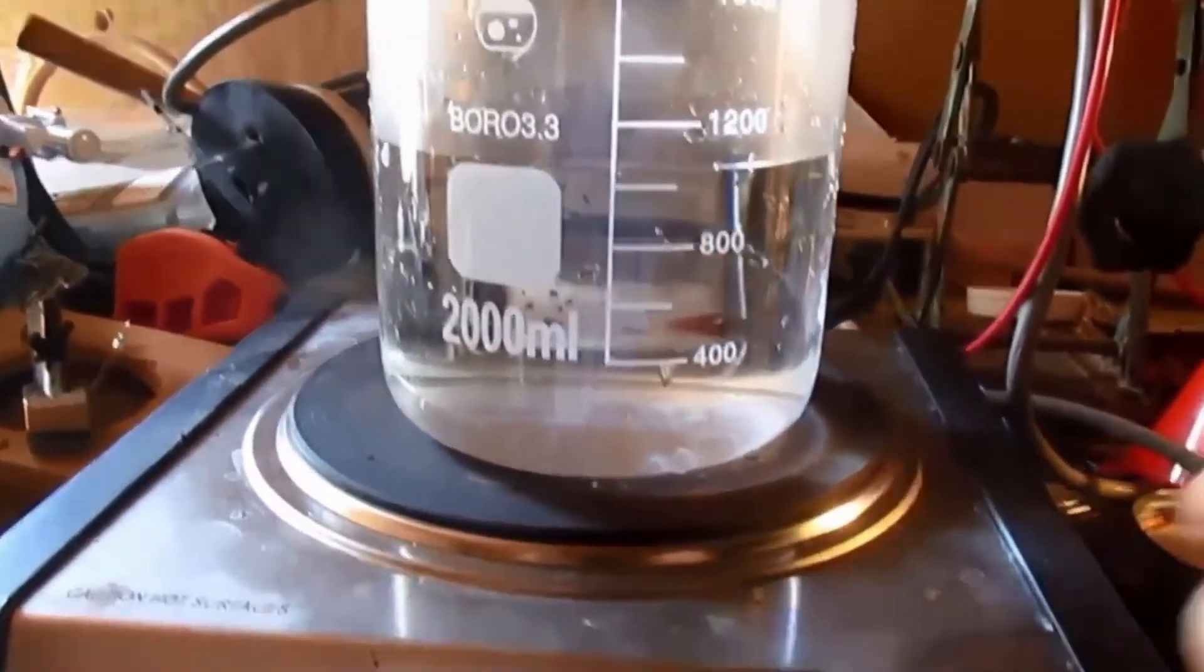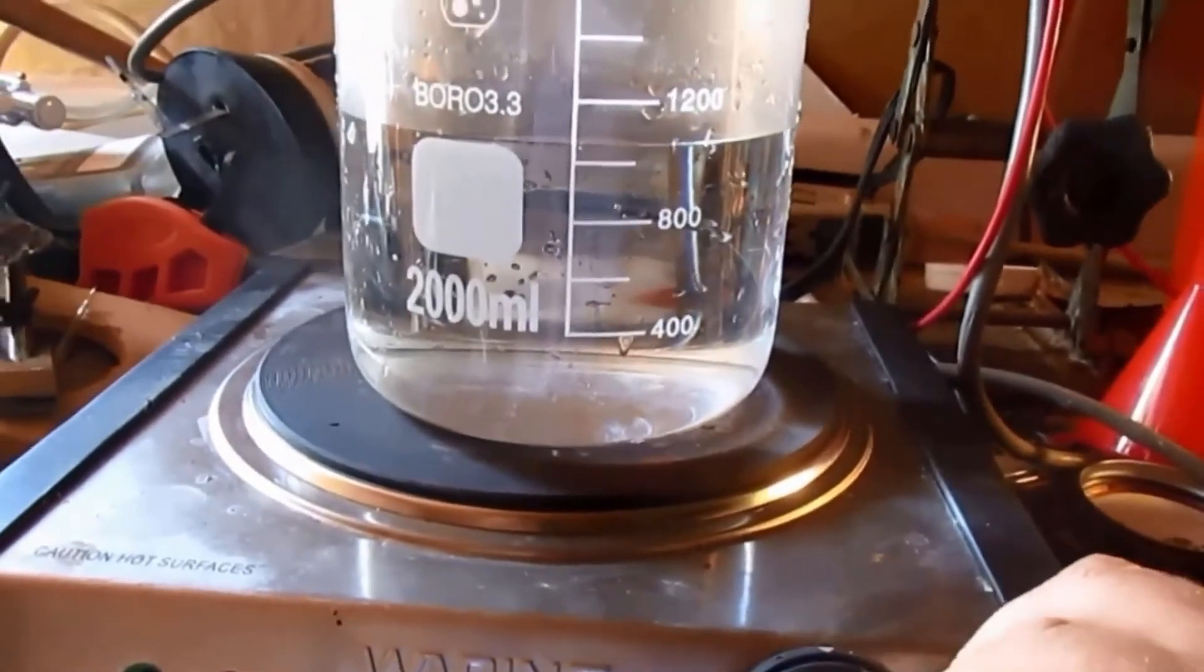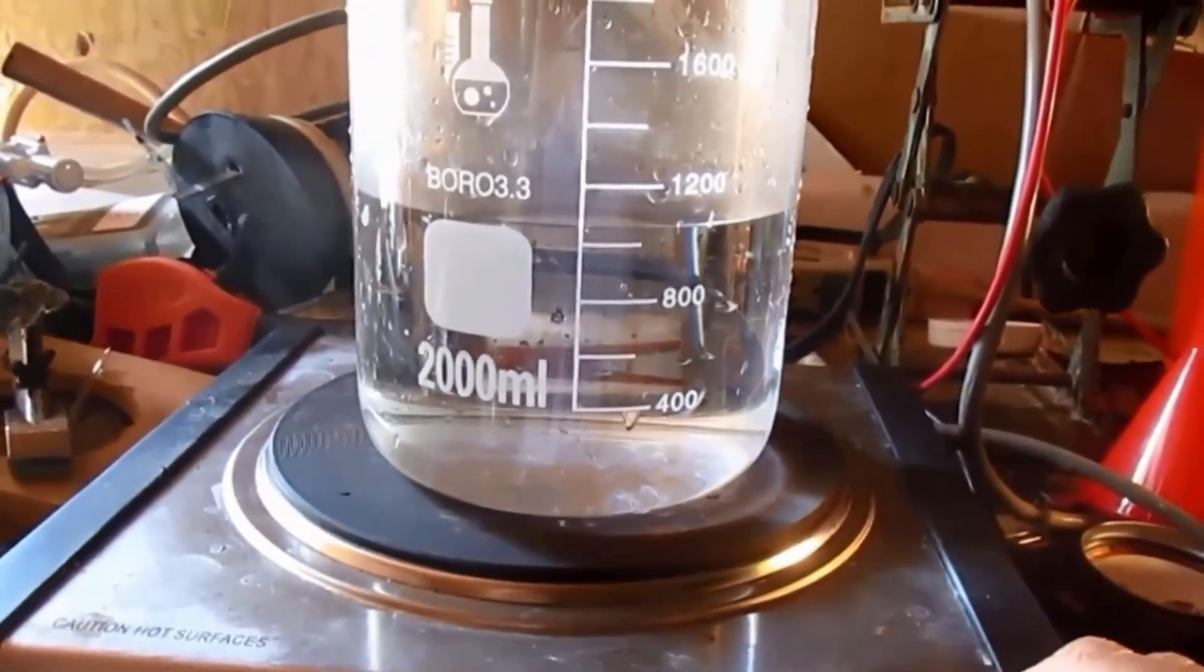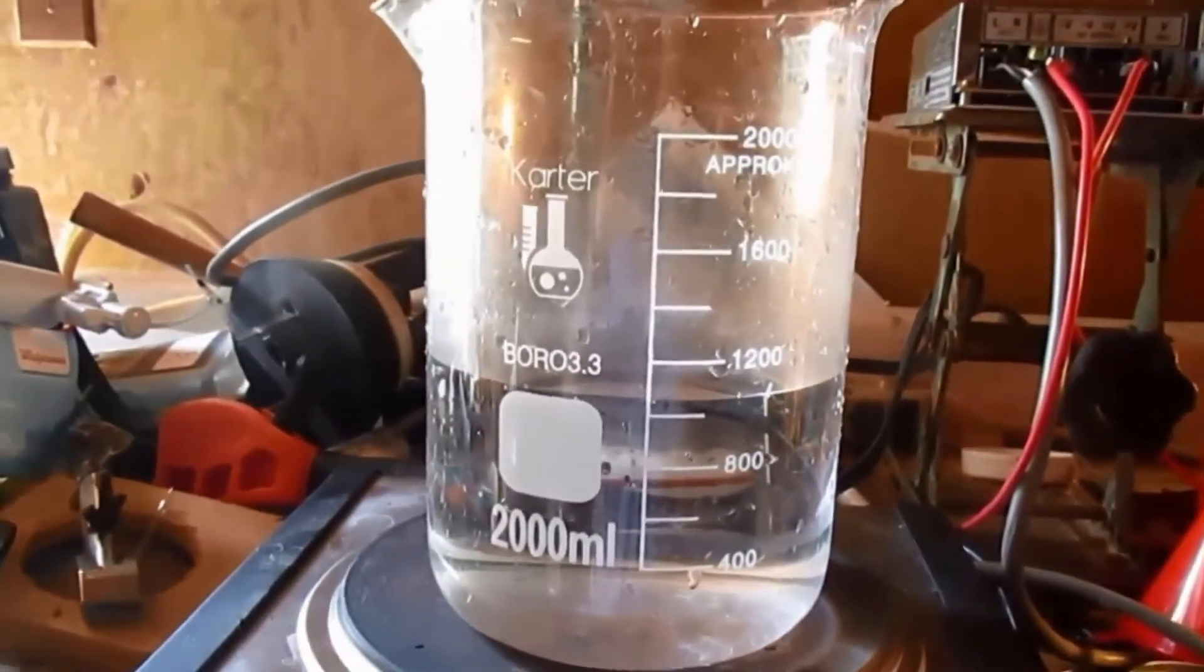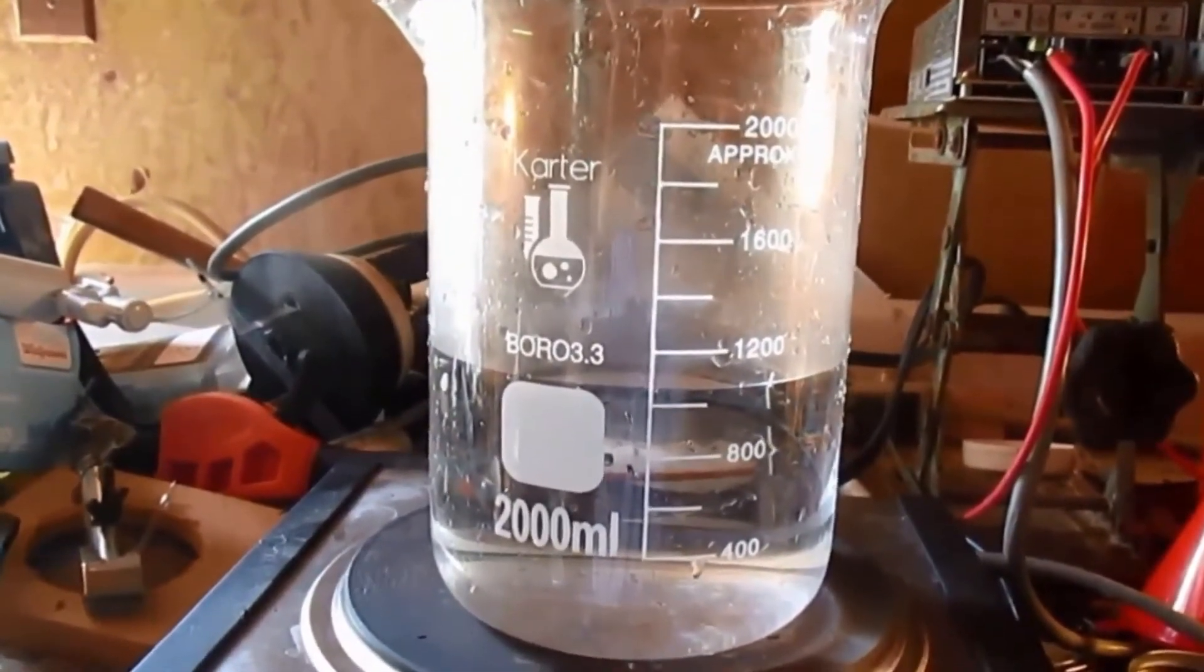Using a hot plate, bring the electrolyte to a boil. This will destroy any remaining sodium hypochlorite in solution. Although there are small amounts, it's still necessary to do.